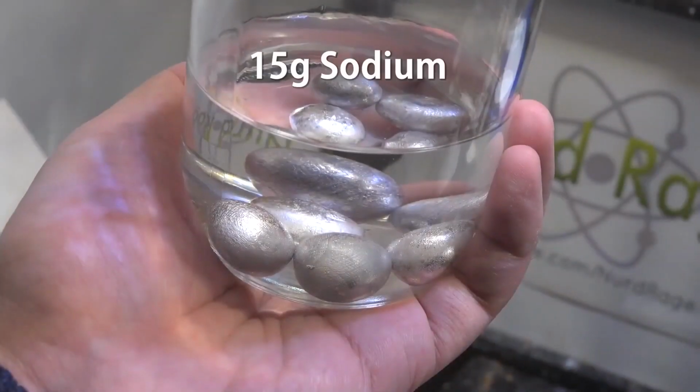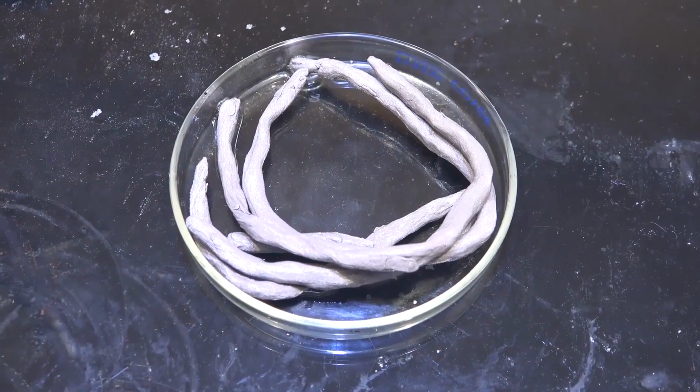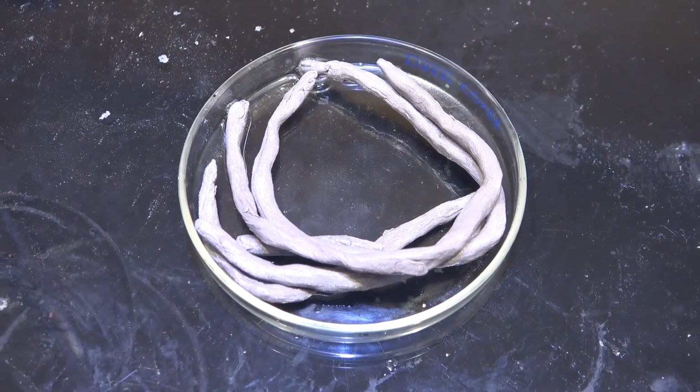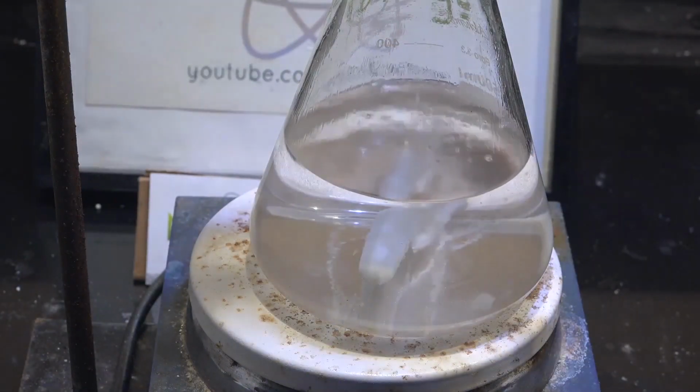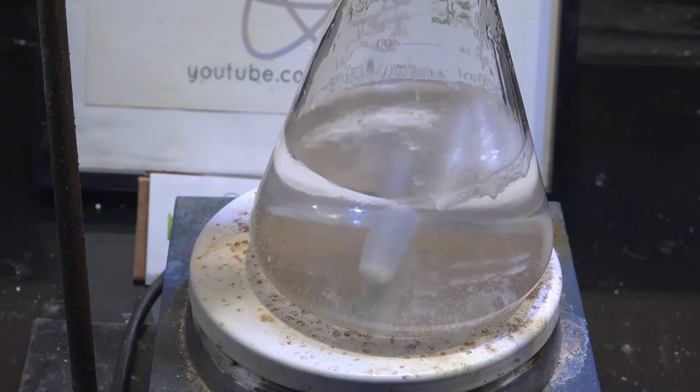Now get 15 grams of sodium metal. Cut and roll the sodium into wires like this so we can drop them into the condenser. Now one by one, drop them in with the cooling water turned on. Don't drop in too much at once or the bubbling will go out of control.